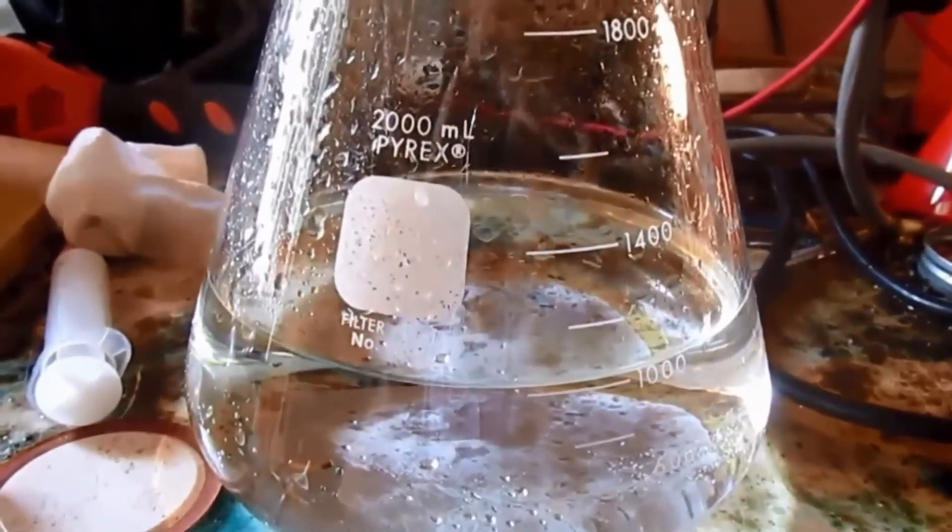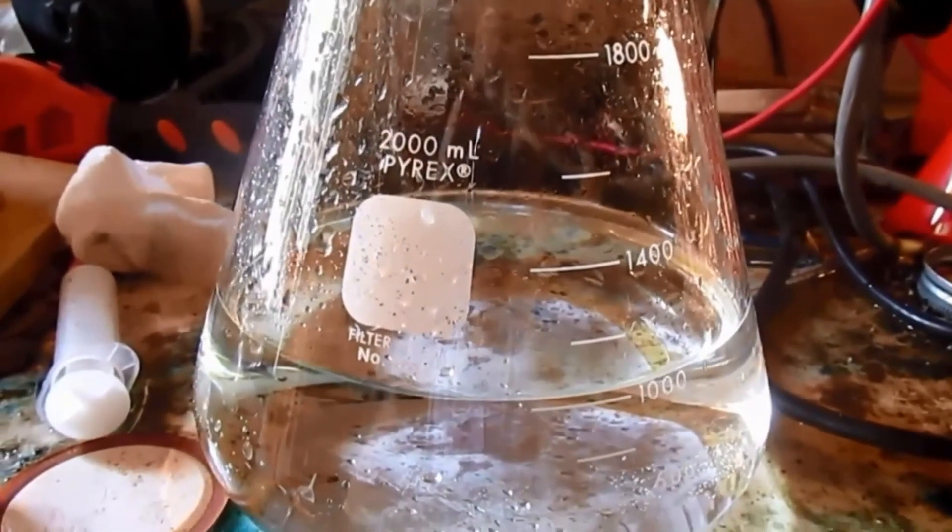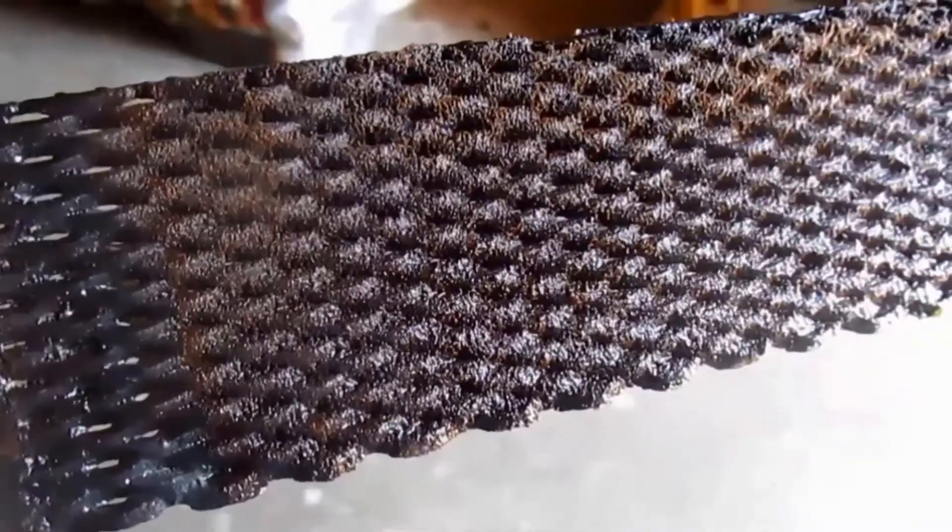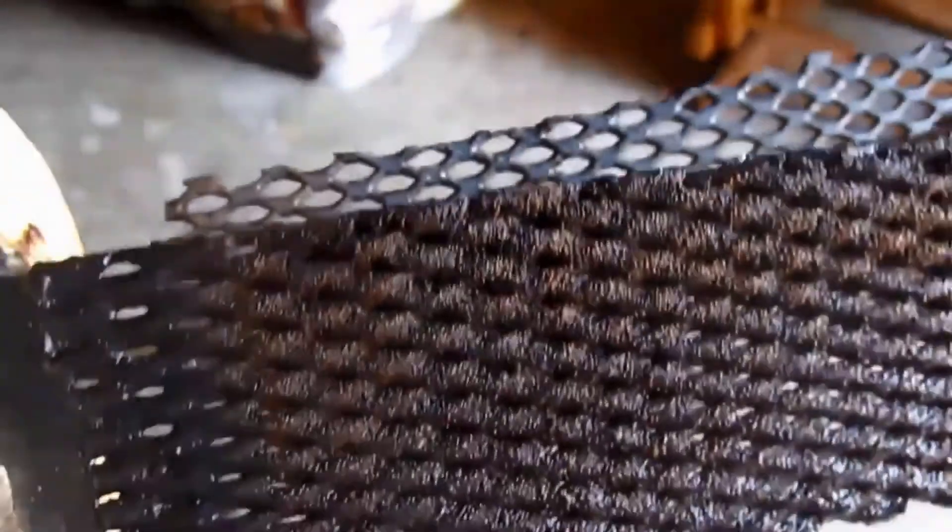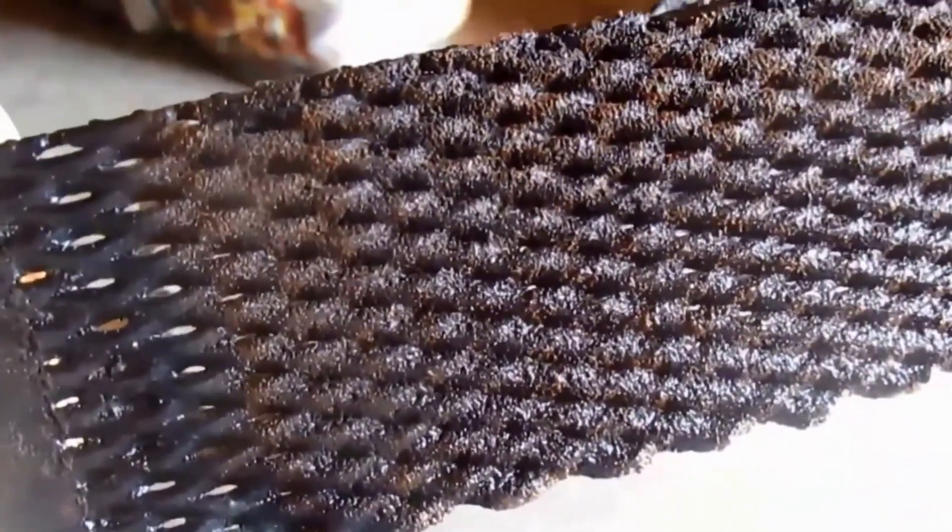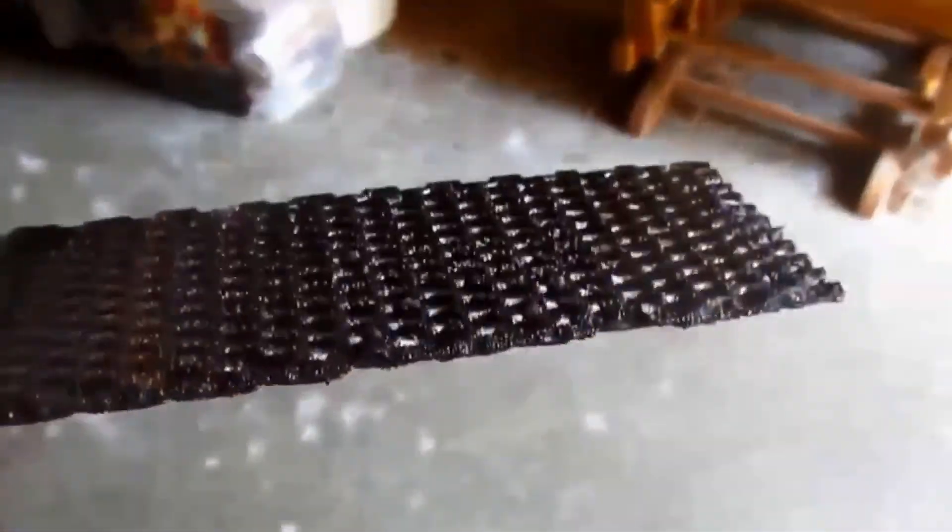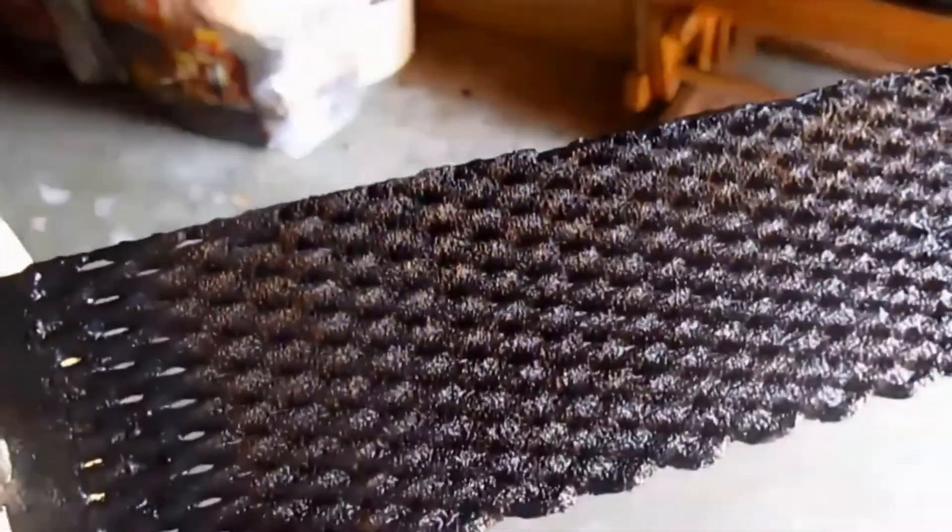To give you a closer look at the anode, this is the titanium substrate lead dioxide anode. As you can see, even after 72 hours—well, around 75—the anode really looks pretty good. It's not even really touched.